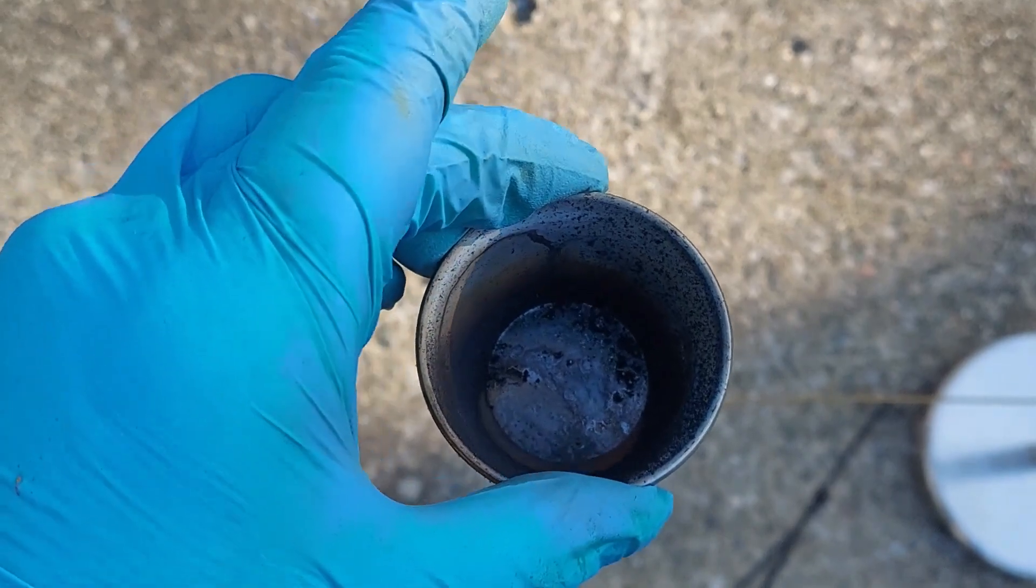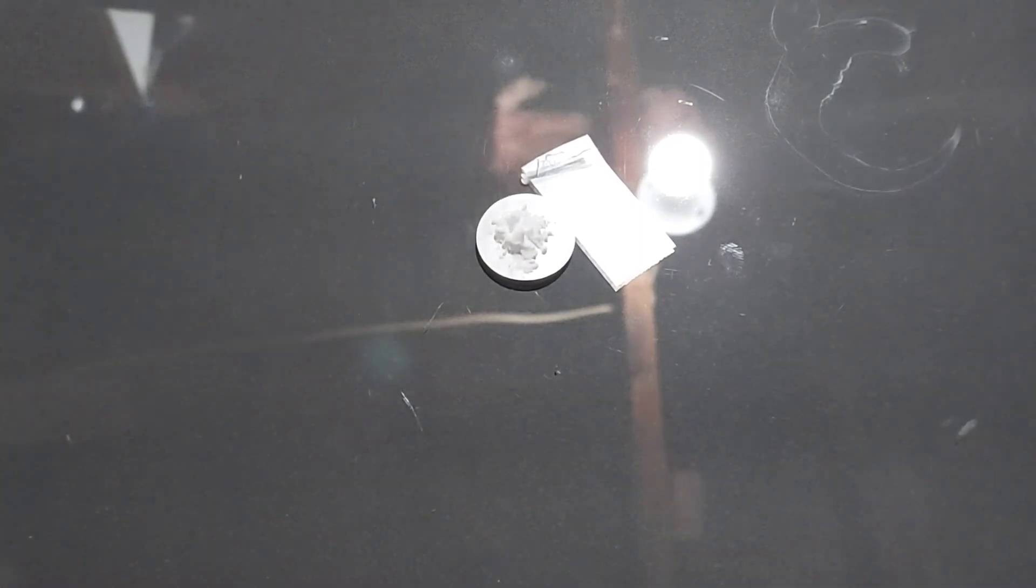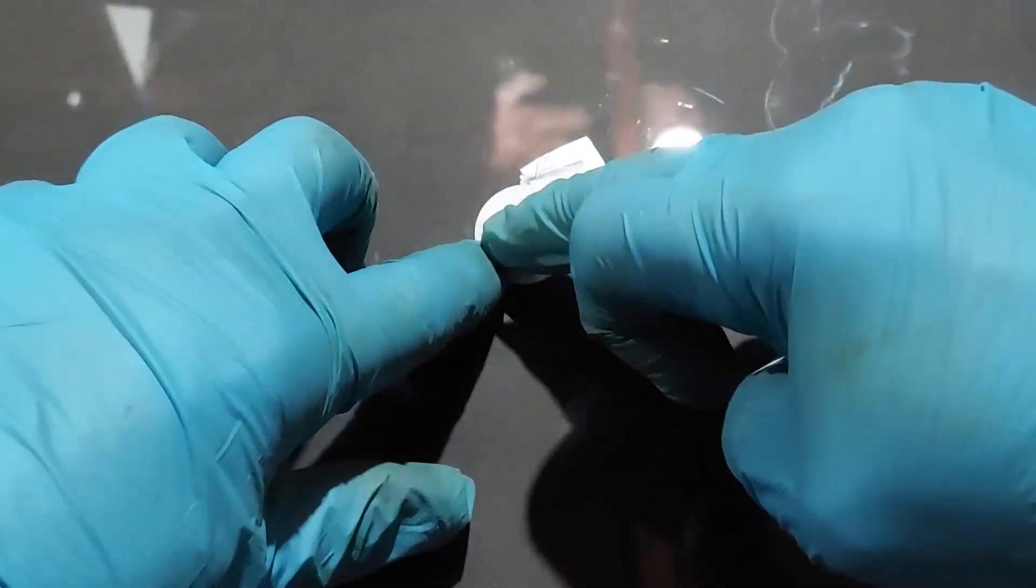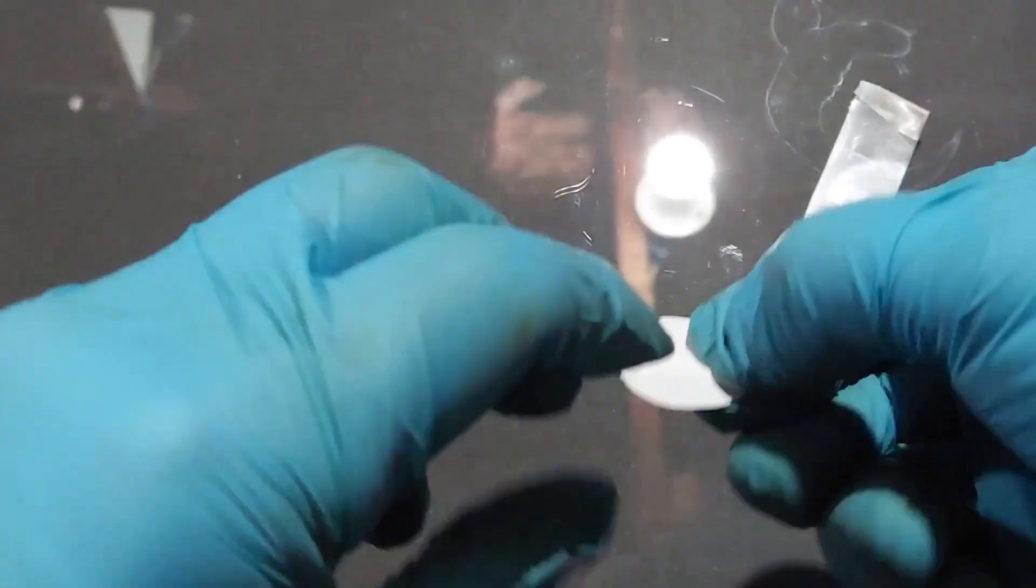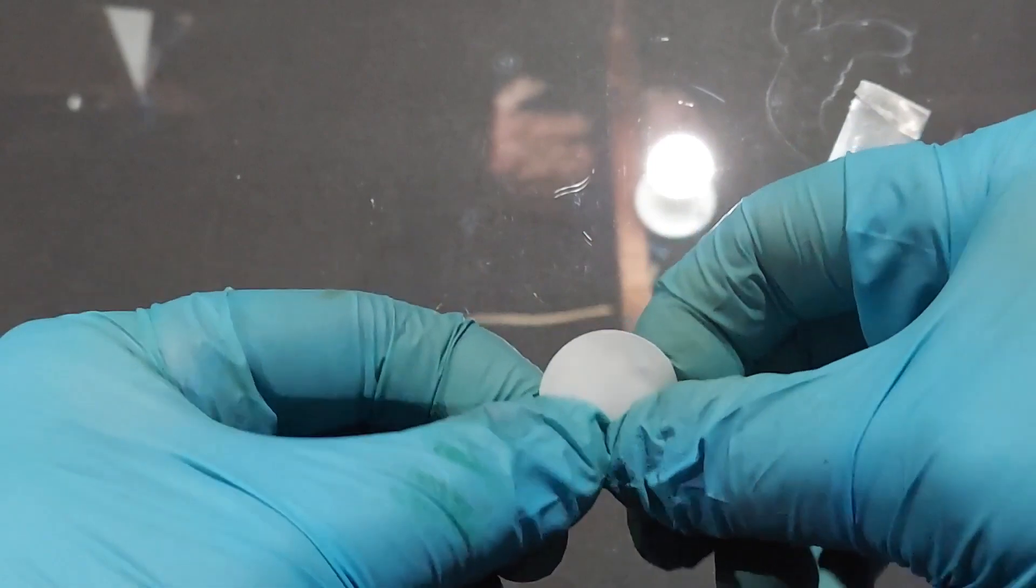This is the inside of that cup and you can see other than a tiny bit of black residue at the very bottom, it did completely burn up. That's one tenth of one gram on a sticker, a round sticker, and I'm going to take another round sticker and stick it on top of it so I can hammer it and see if we can't get it to pop.